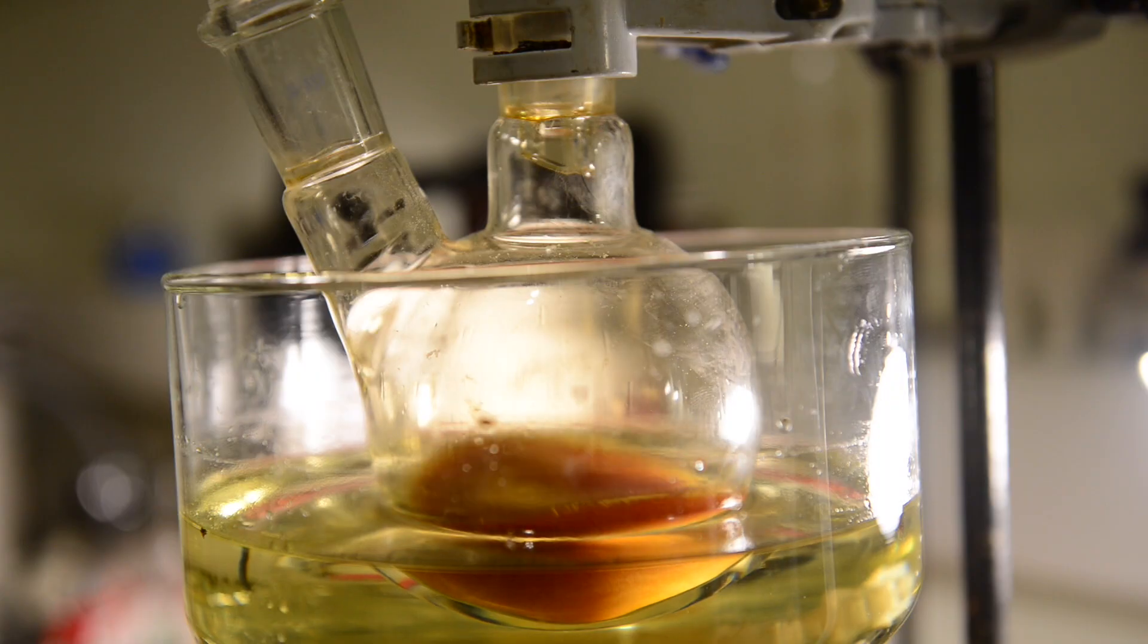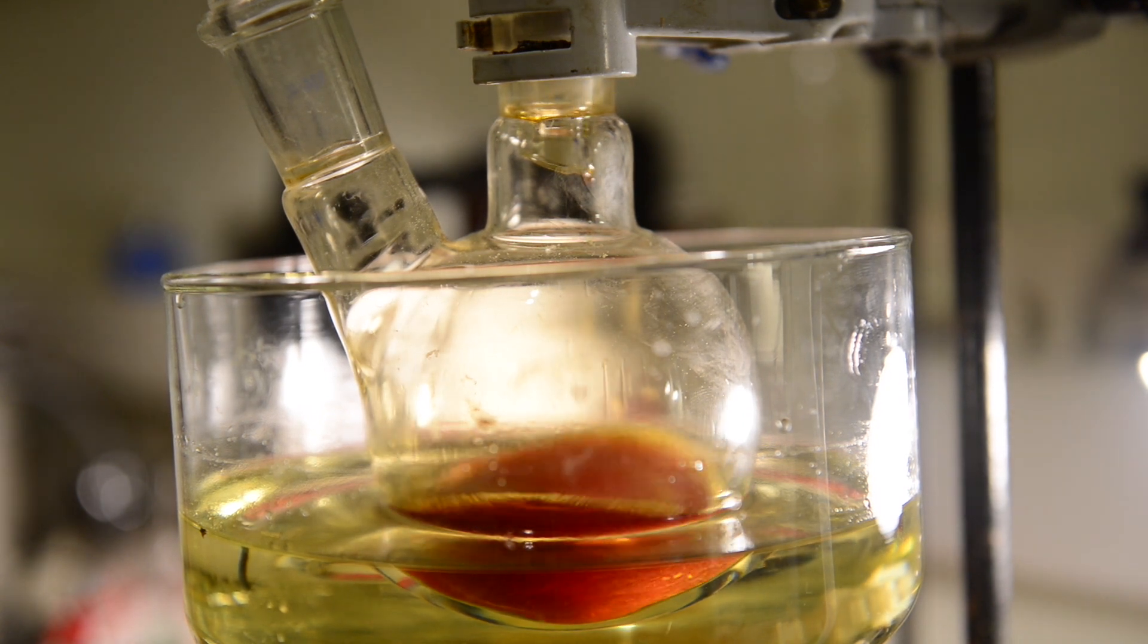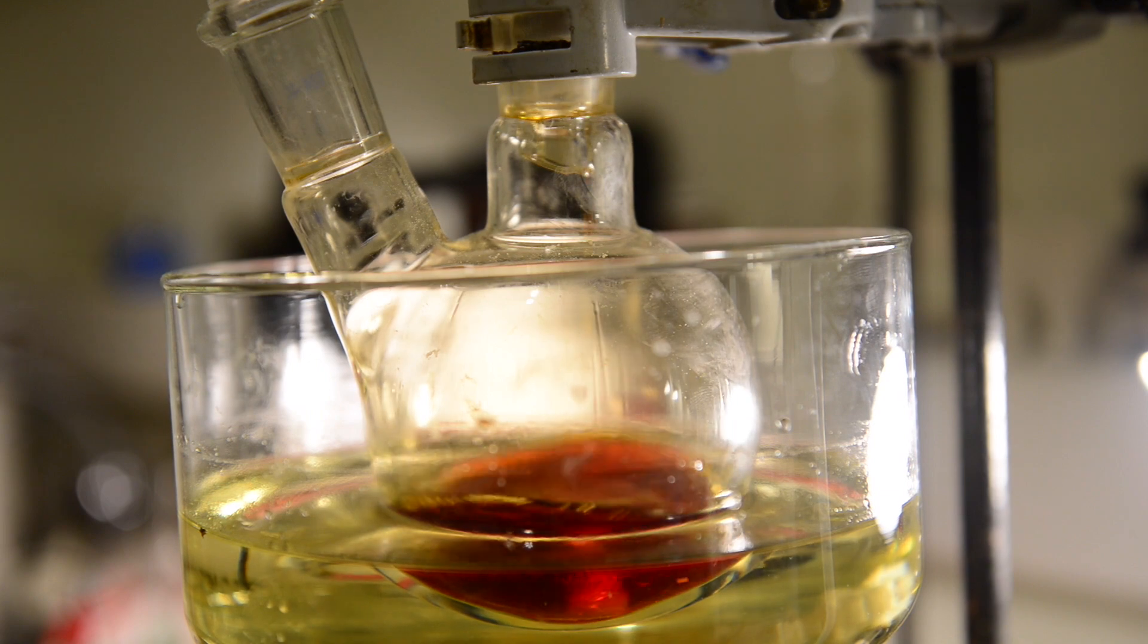Like before, the reaction mass has become transparent red for a few minutes and has been turned into opaque again. The red liquid in the flask remains as a sunset on the beach.